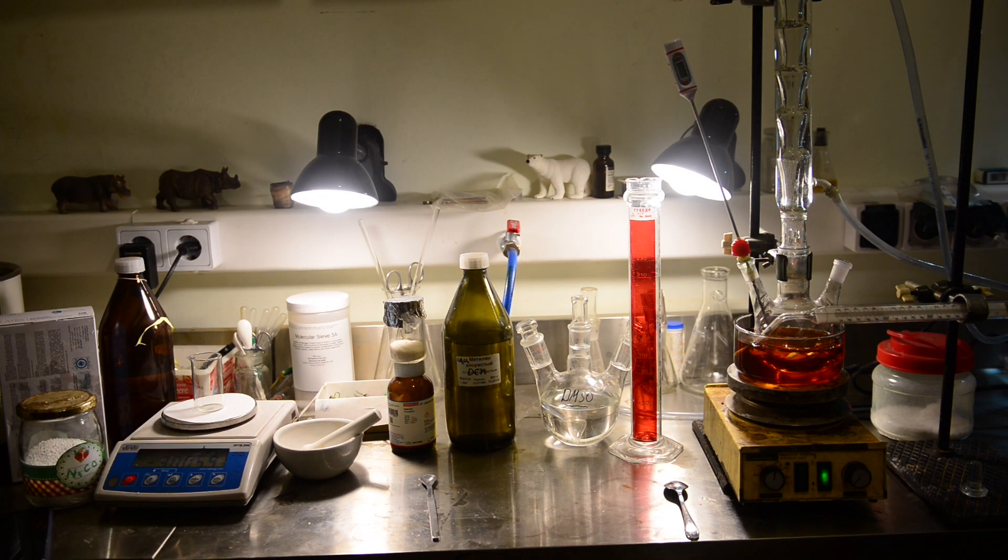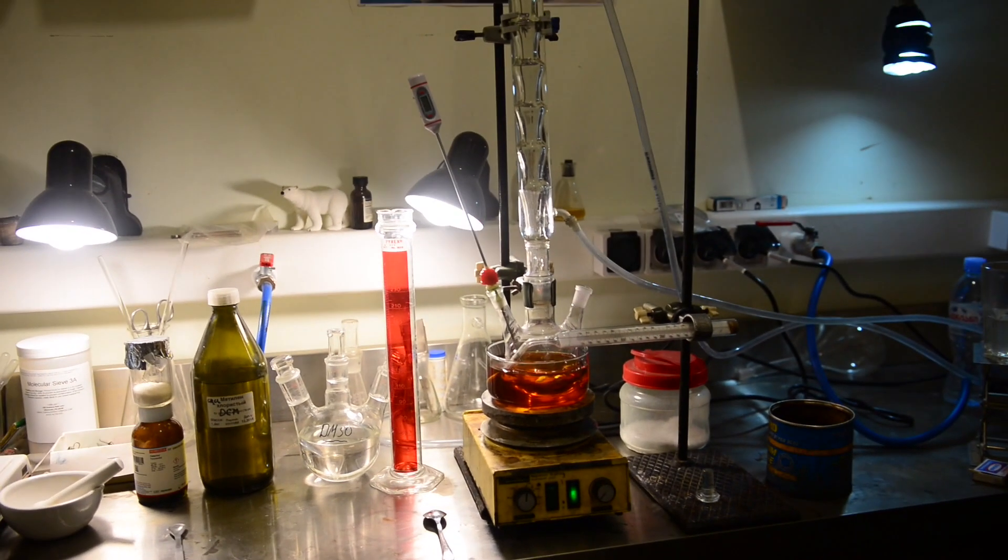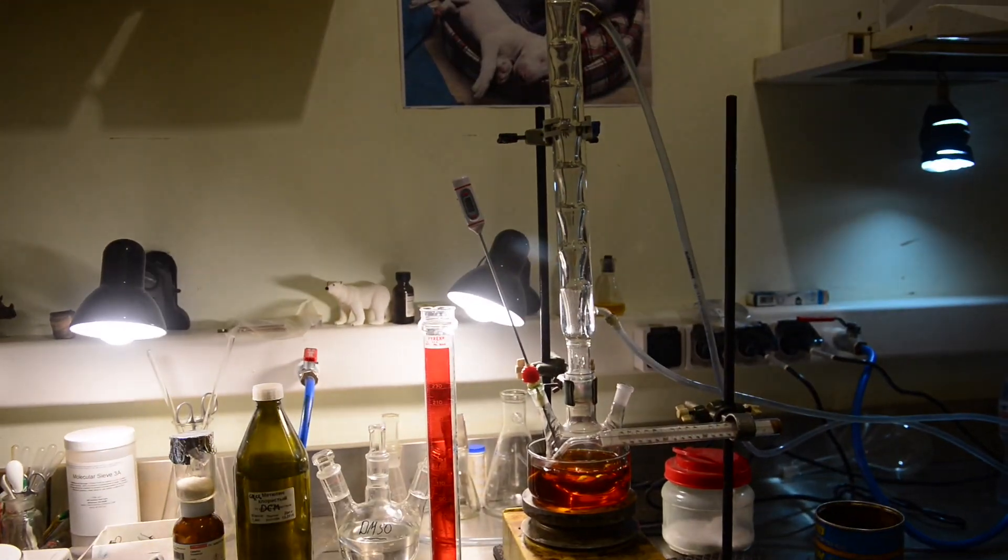As you can see, we have assembled the apparatus using a 250 milliliter three-neck round bottom flask equipped with a thermometer and large reflux condenser. The flask is submerged in the oil bath.